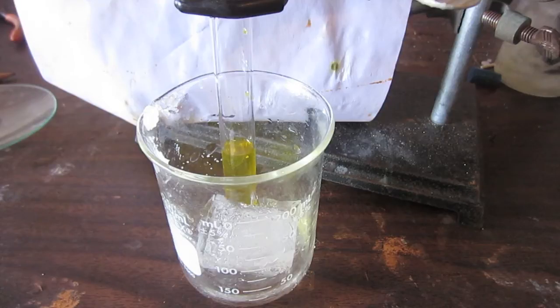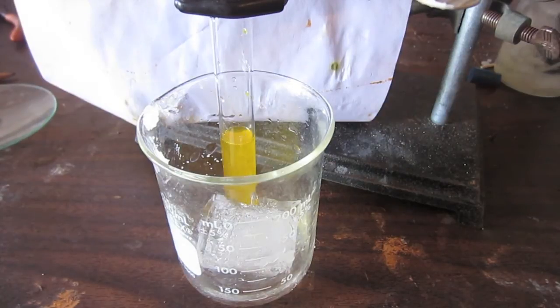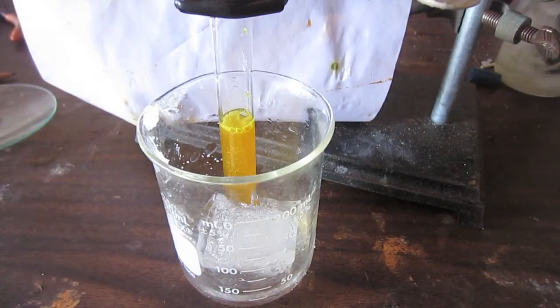Put the solution in an ice bath and get it down to around 0°C. Then, slowly add 3 milliliters of 30% hydrogen peroxide. Here I have this speeded up double time.